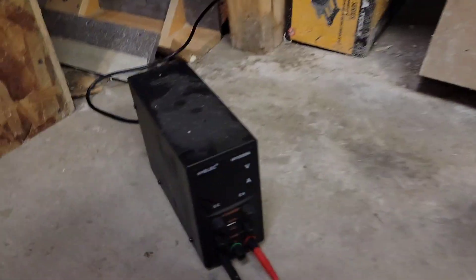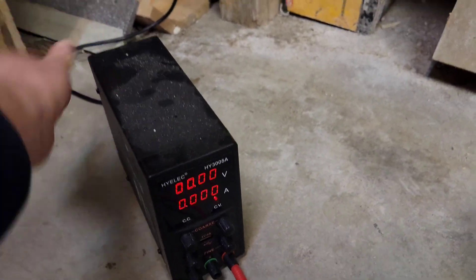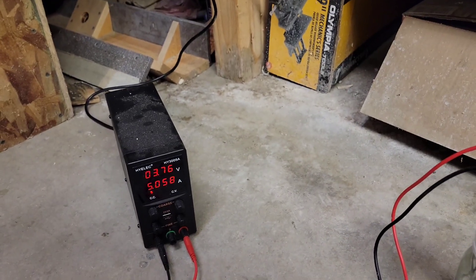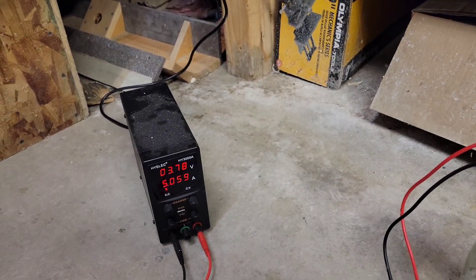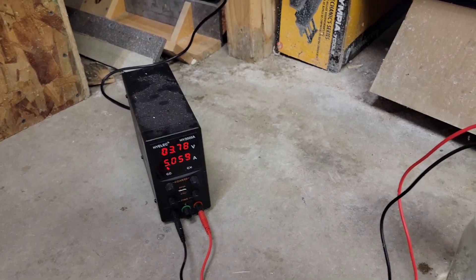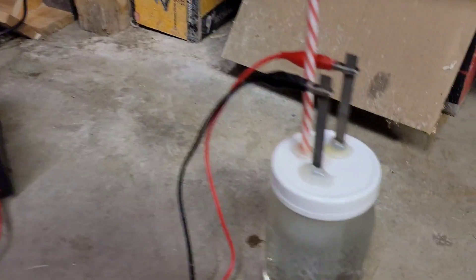Okay, that being said, let's go ahead and turn it on. I have mine preset for the maximum amperage. It's supposed to go to five, was a little bit over actually, and being at 3.7 is really good. So come look over here, you can see it is working really nicely.